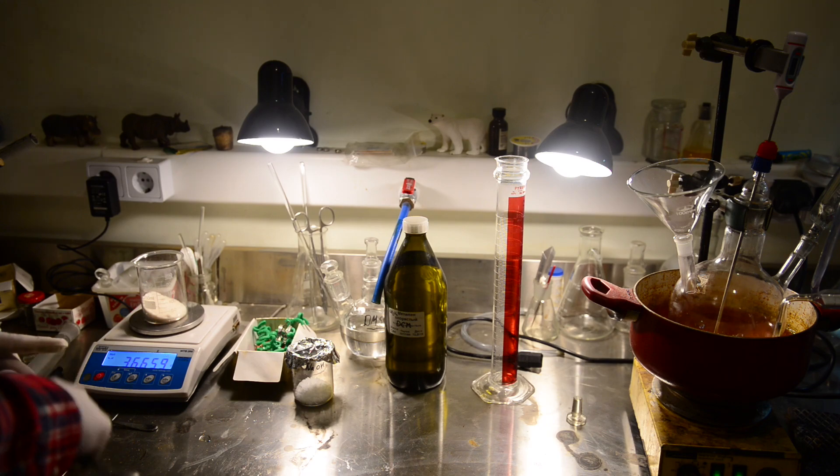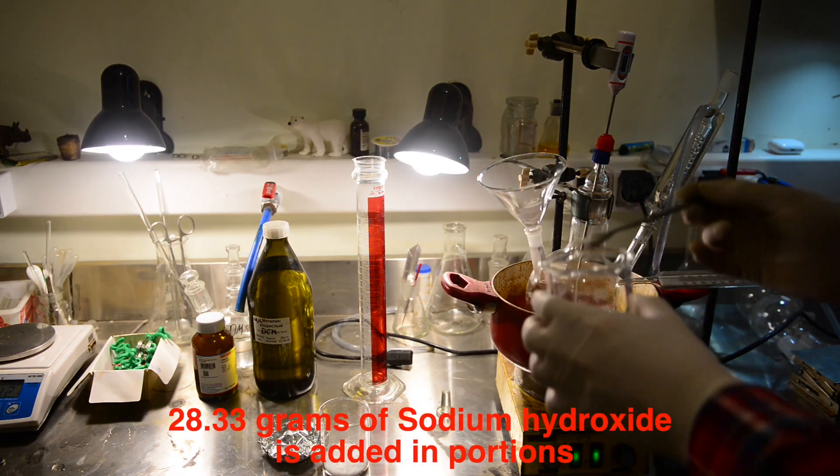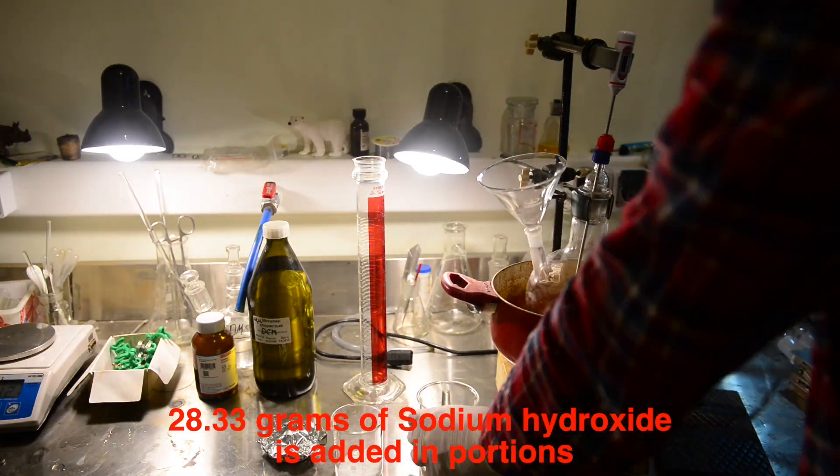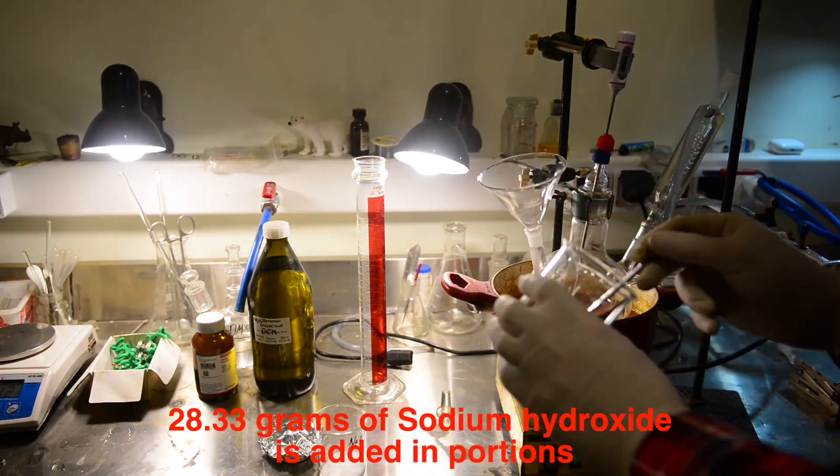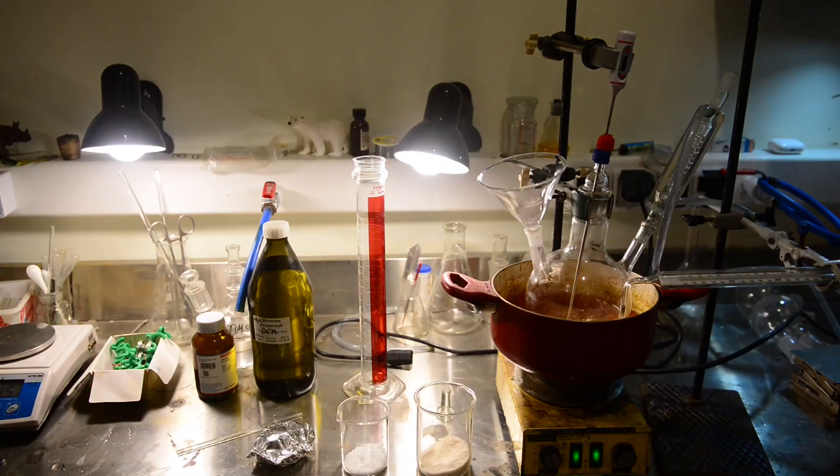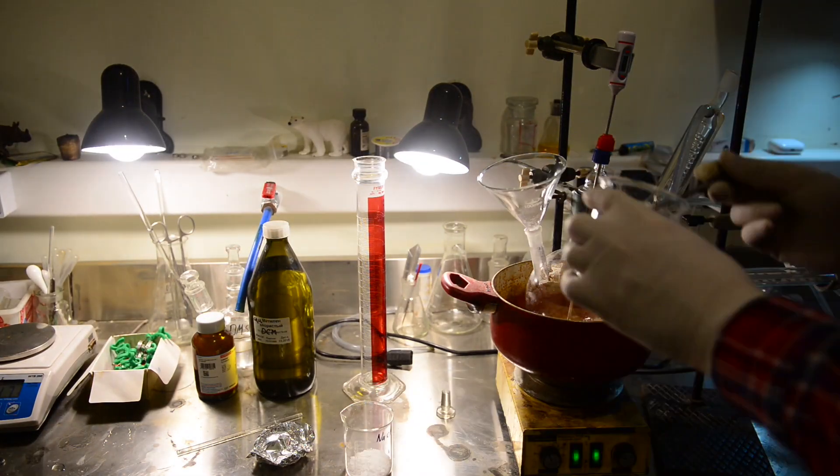According to the procedure, the catechol and sodium hydroxide should be added portion by portion while the solution of dichloromethane is heated. Unfortunately, in the procedure the addition rate is not clearly defined. We were expecting the dichloromethane to start to boil at around 40 degrees, and we were in a rush to finish the addition of catechol and the base.